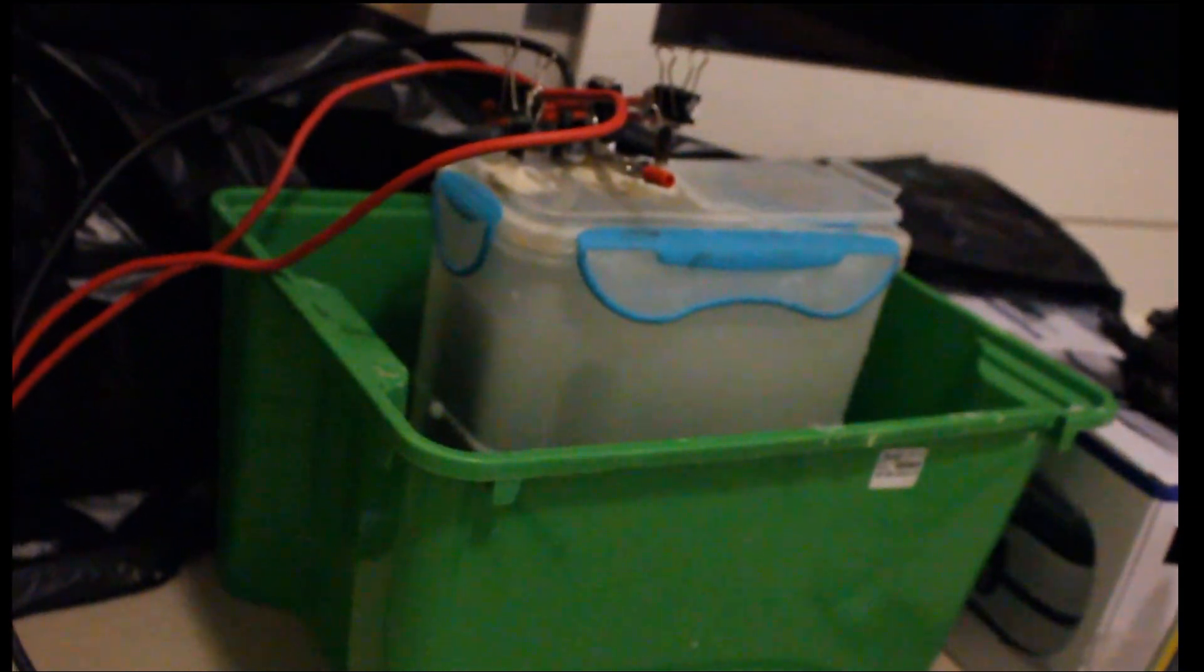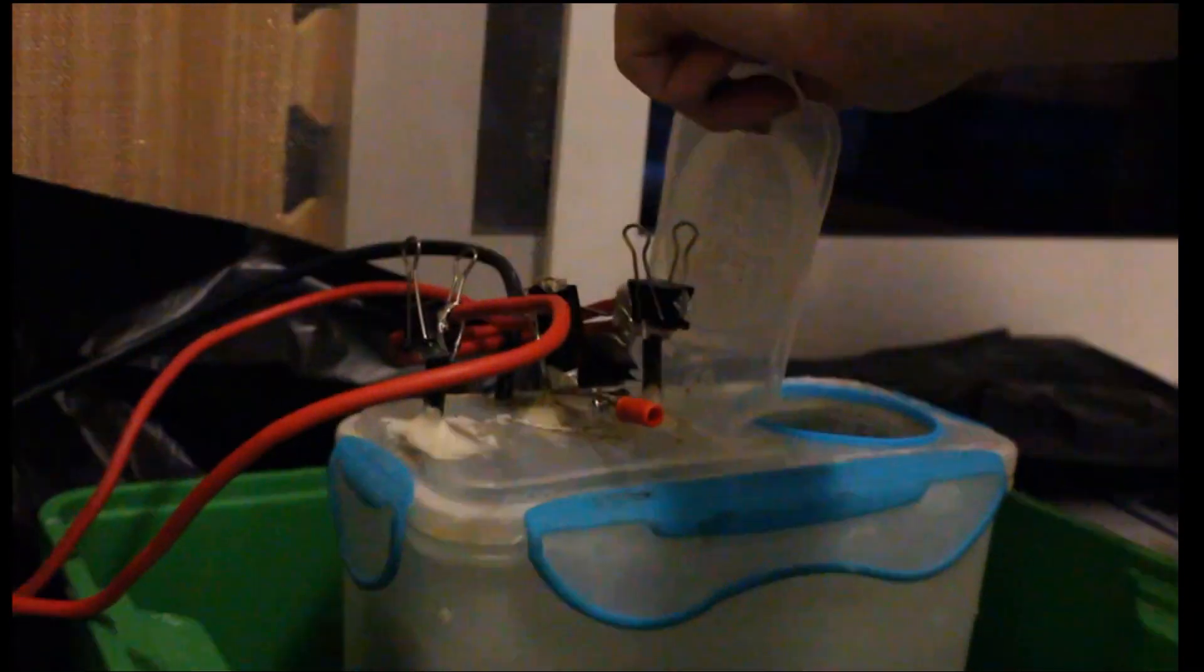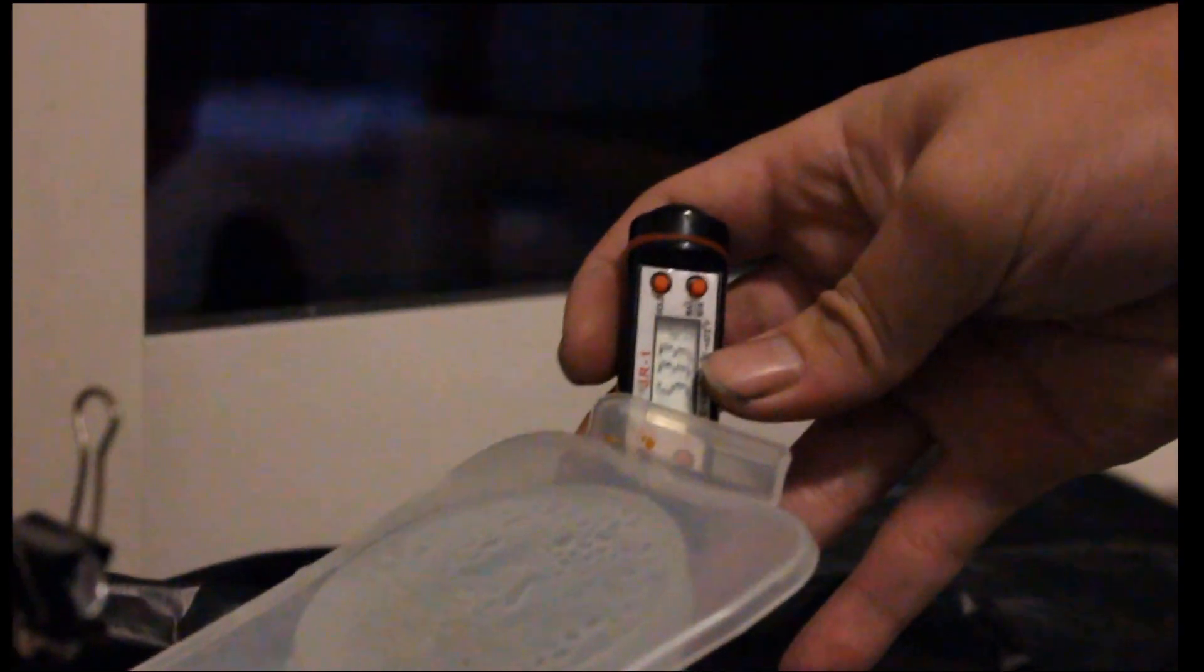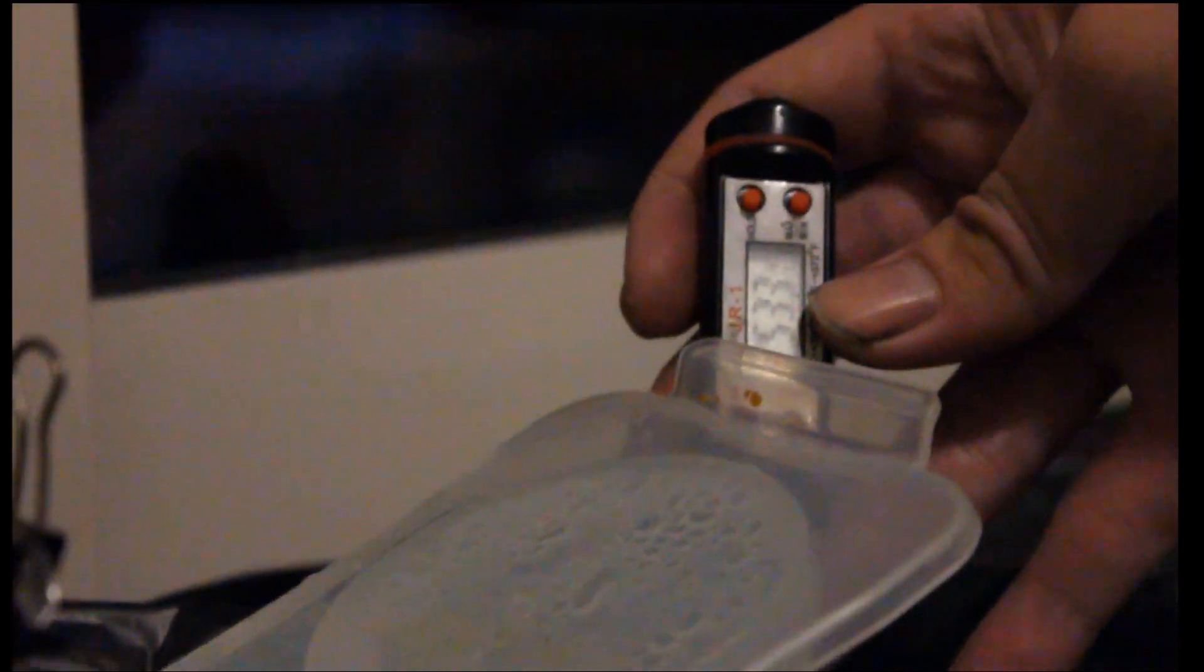The temperature of this cell is around 55, but it may have dropped or risen. Right now it's 53, and the reason why I'm keeping the temperature low is due to water inside this green bucket which is preventing this cell from overheating. Without the water, the temperature goes all the way up to 68 and I don't really like running too hot.